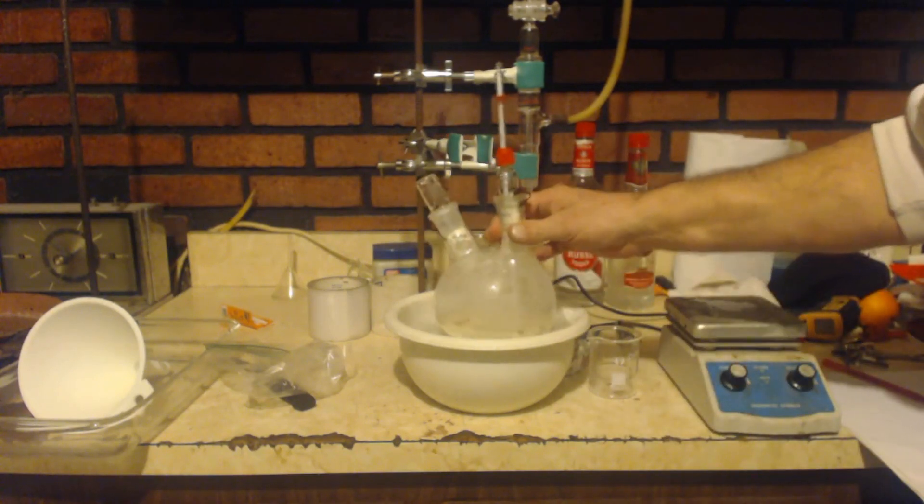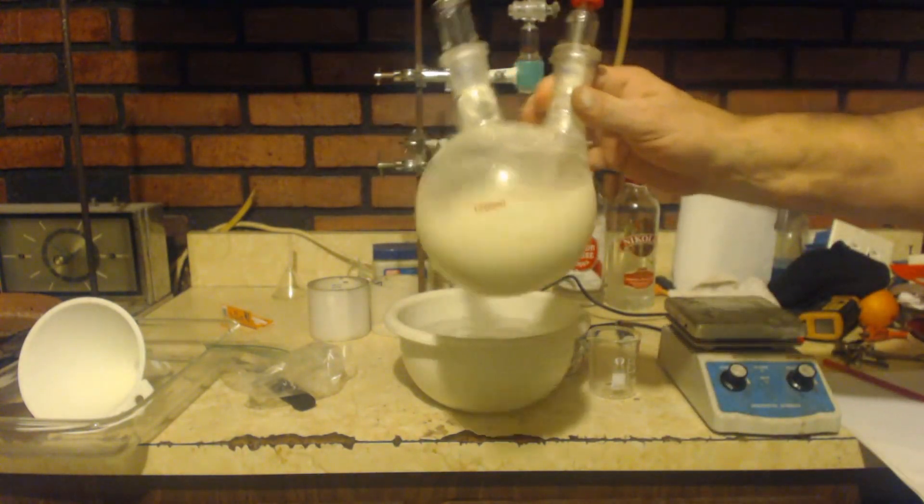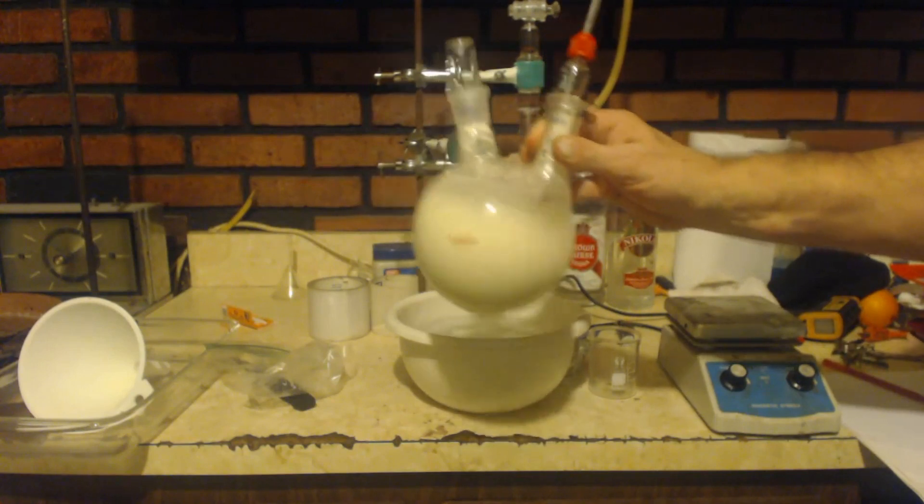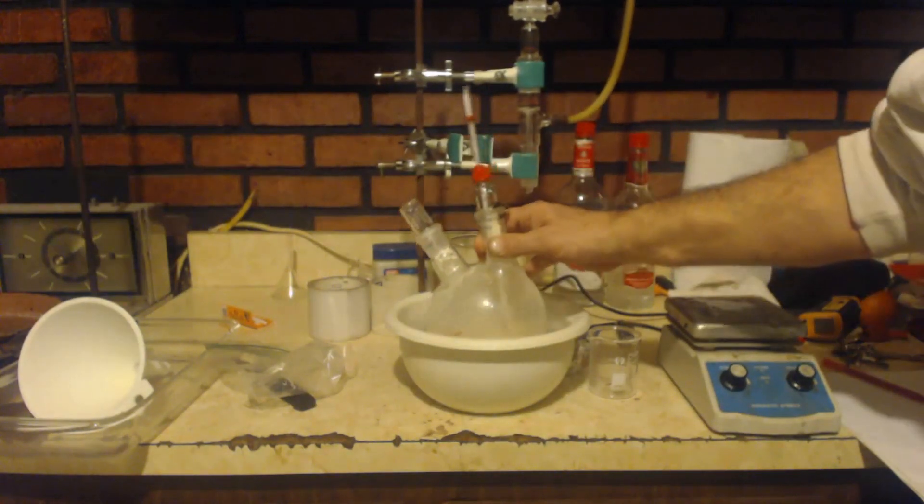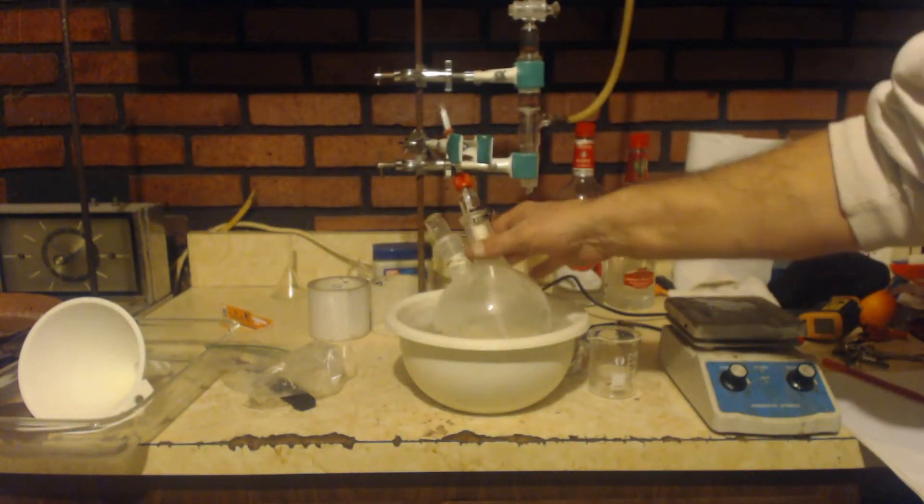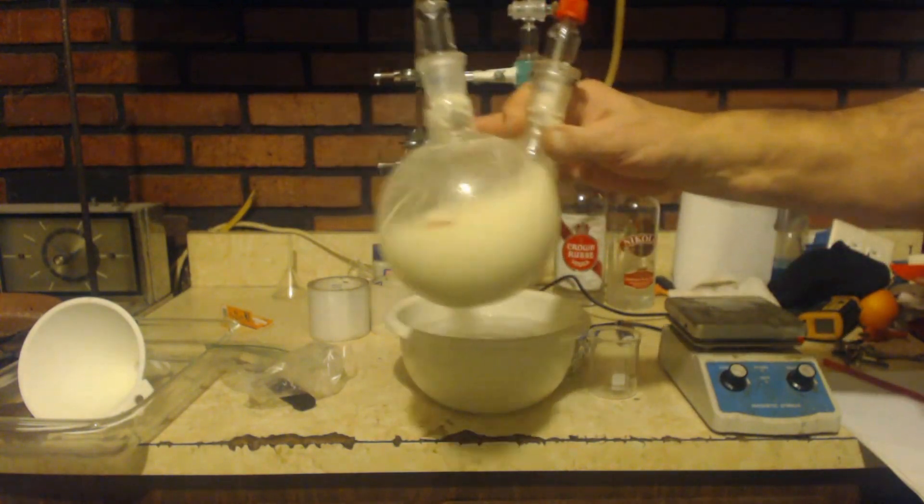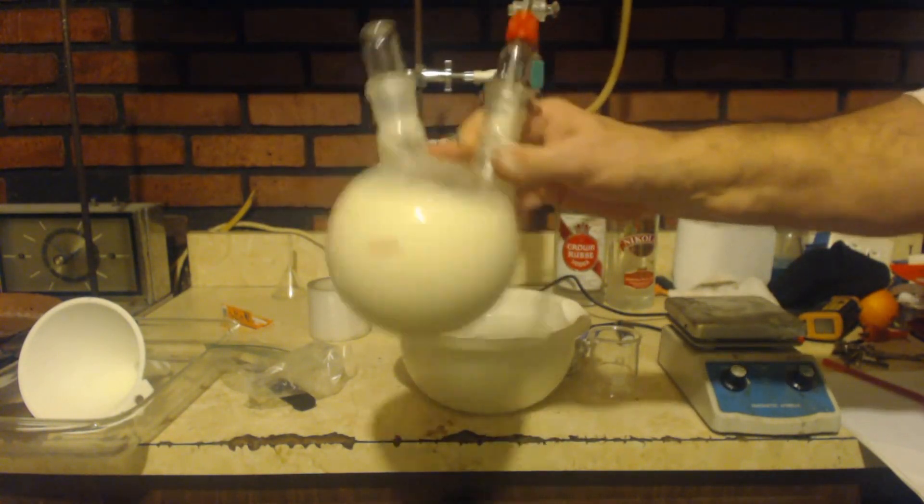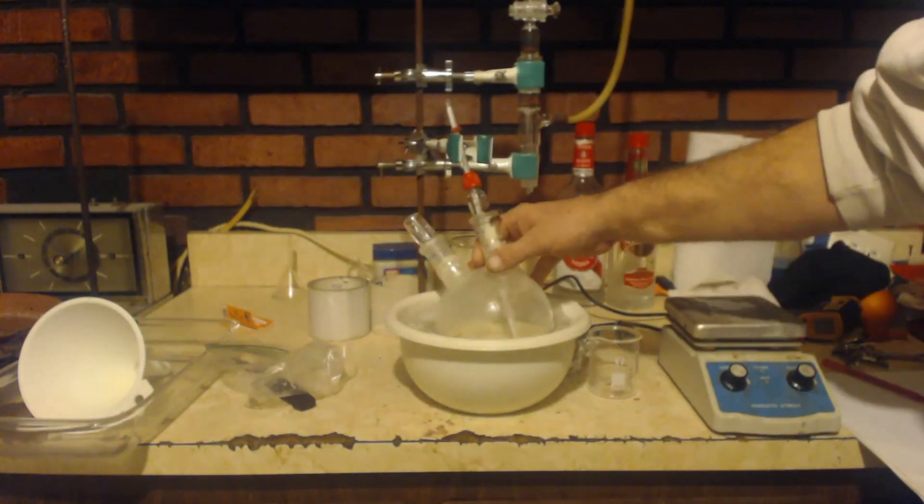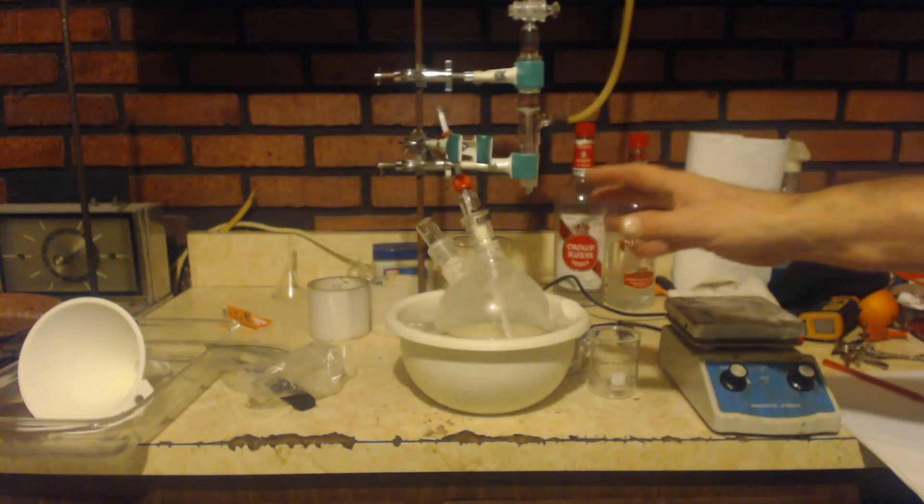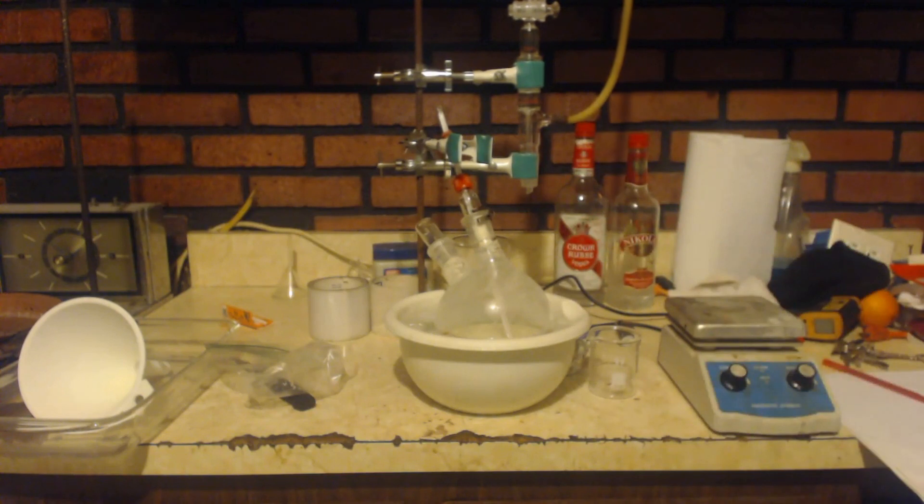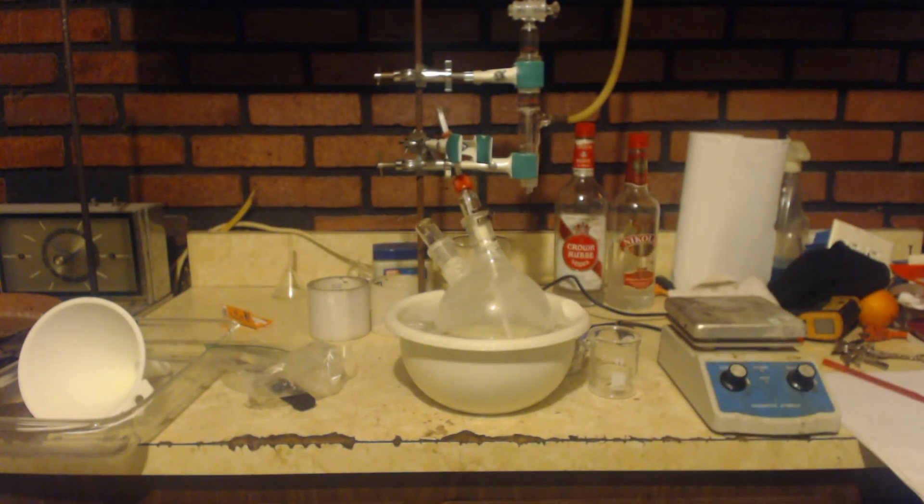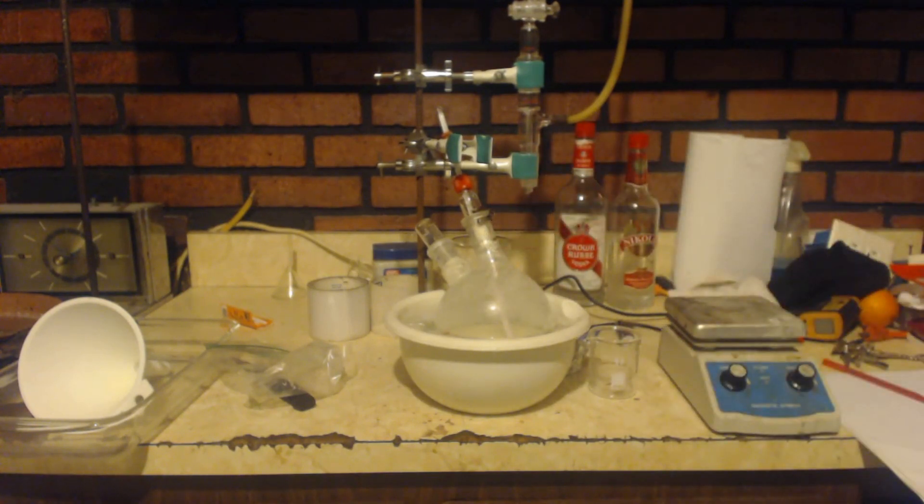The magnetic stir just isn't strong enough to stir this. So now I'm going to have to sit here and do it manually pretty much. And it's probably going to take longer, although I'm stirring it a lot more vigorously than a stir bar would. But you're supposed to keep this between 8 and 12 degrees, say 10 degrees Celsius. So I'll get back to you when maybe another hour goes by and we'll see.